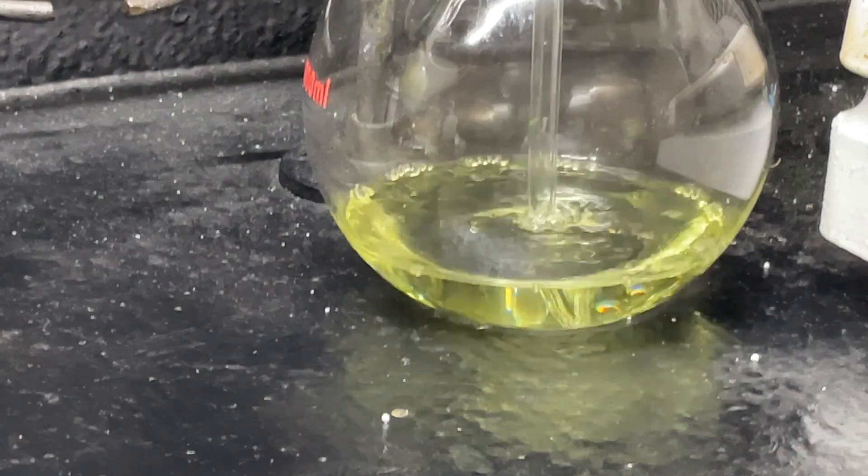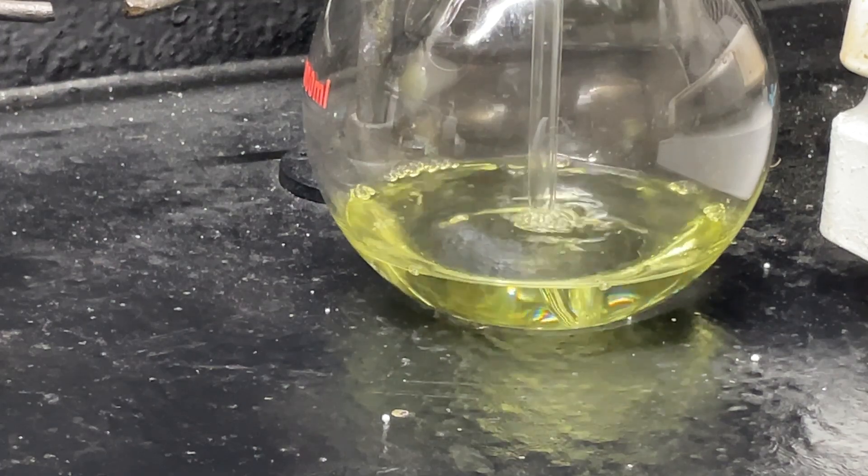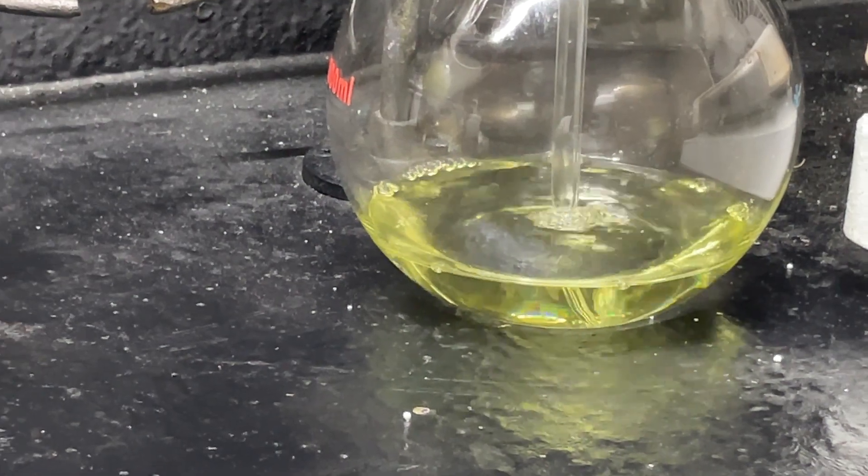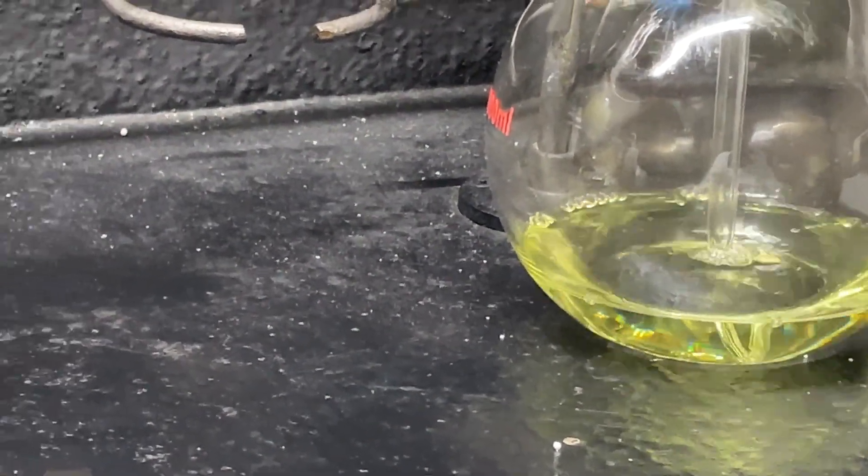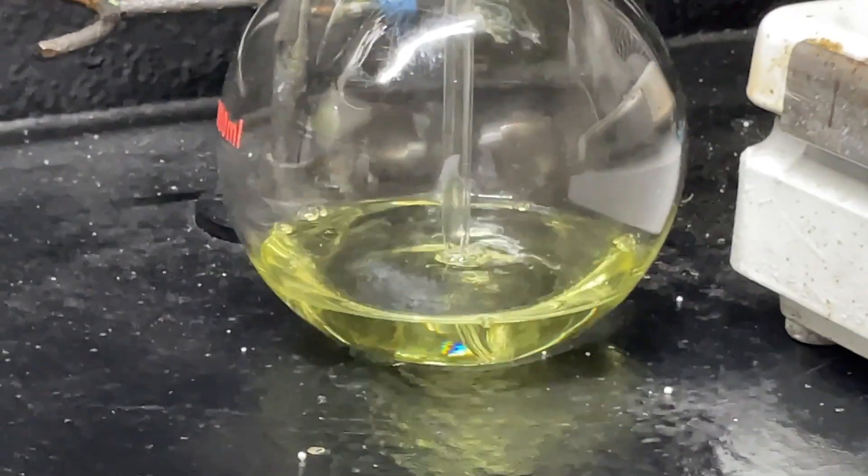Now as you see the solution is starting to turn more yellow which means we're starting to get chlorine gas into the solution, so that is good. And we're pretty much just going to release all of our chlorine here into there and we should get our chloroacetophenone, our active ingredient in mace.